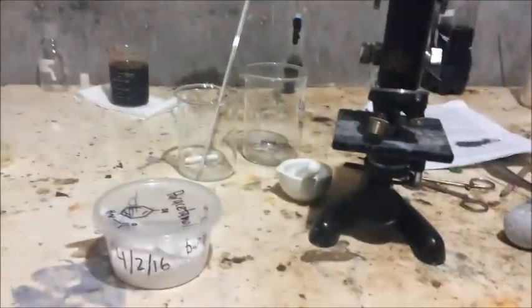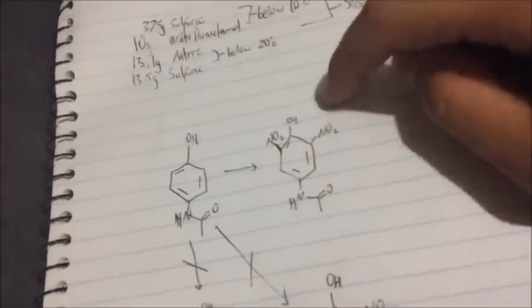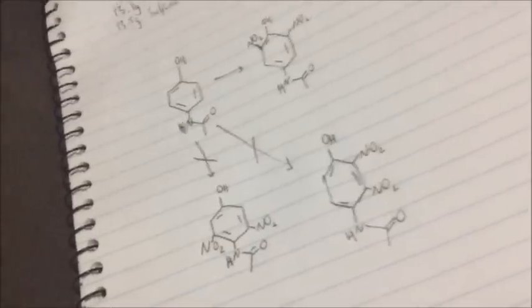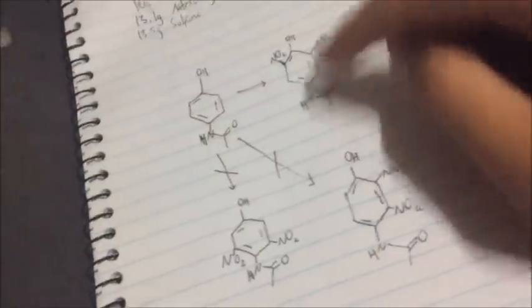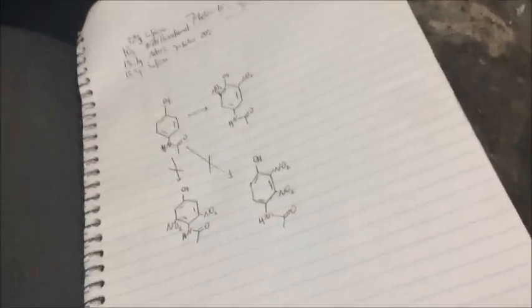What we're going to do is a nitration of the paracetamol. I do chemistry at university and we covered aromatic chemistry — what we're doing here is nitrating the paracetamol to get two nitro groups in specific positions. When you think about it, you wonder why we don't get the nitro groups in other positions — I won't delve into the theory, but we really only get this one product. It's quite interesting why that happens; I'd recommend studying this if you're into chemistry.